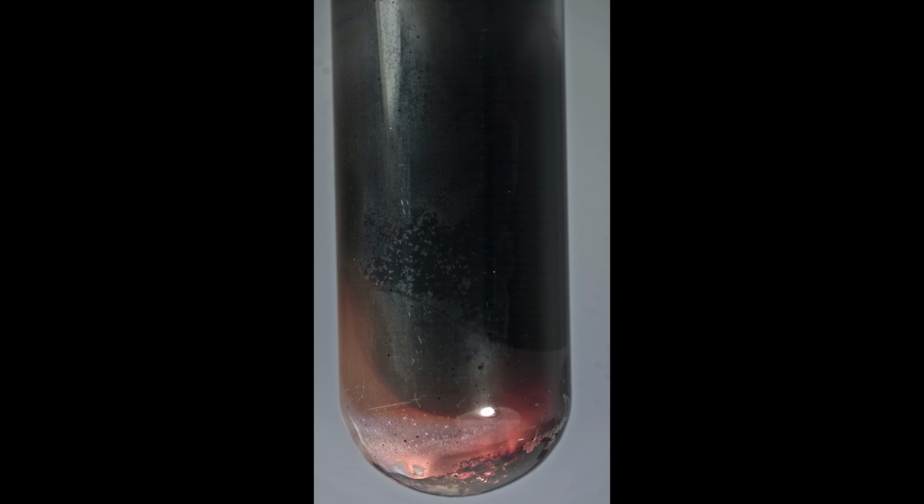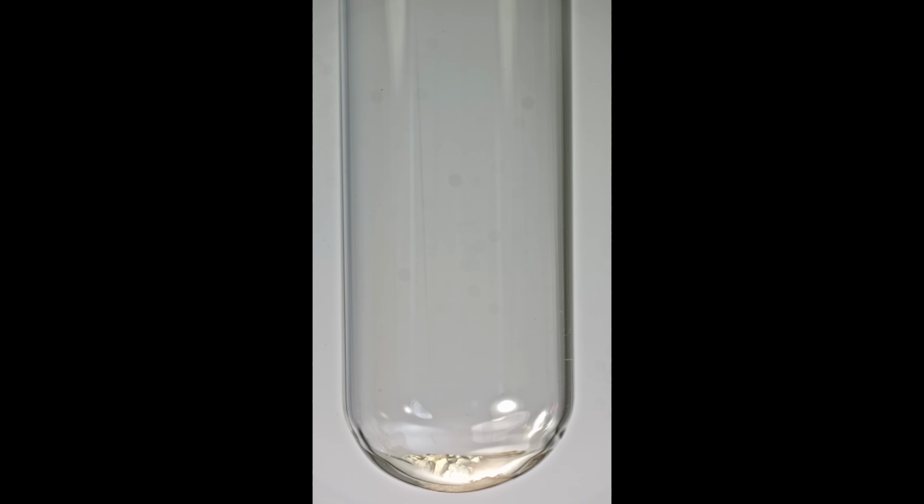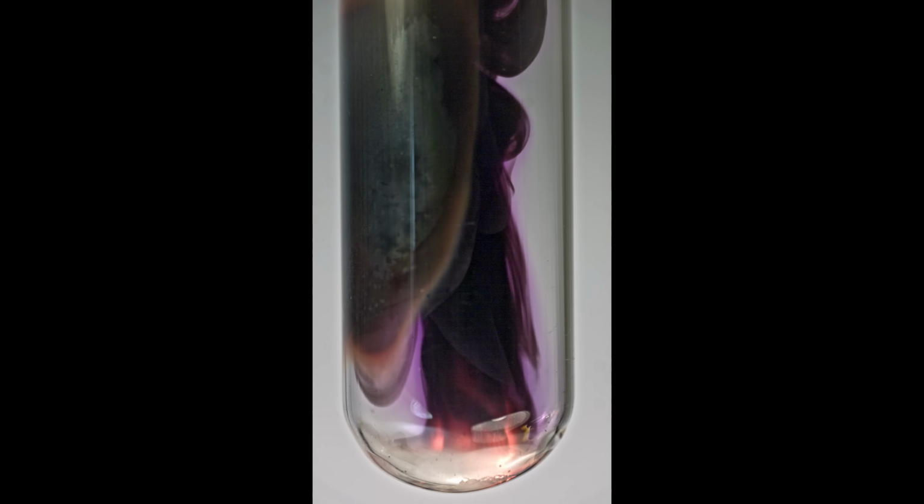Besides the purple iodine vapors and the soot, you can also see a flame forming. That made me curious whether it would decompose the same way in an inert atmosphere. So I carried out the next reaction in an argon atmosphere, and the decomposition was exactly the same. This proves that the decomposition of diiodoacetylene is not combustion involving oxygen, but rather an internal, fully self-sustained, exothermic decomposition.